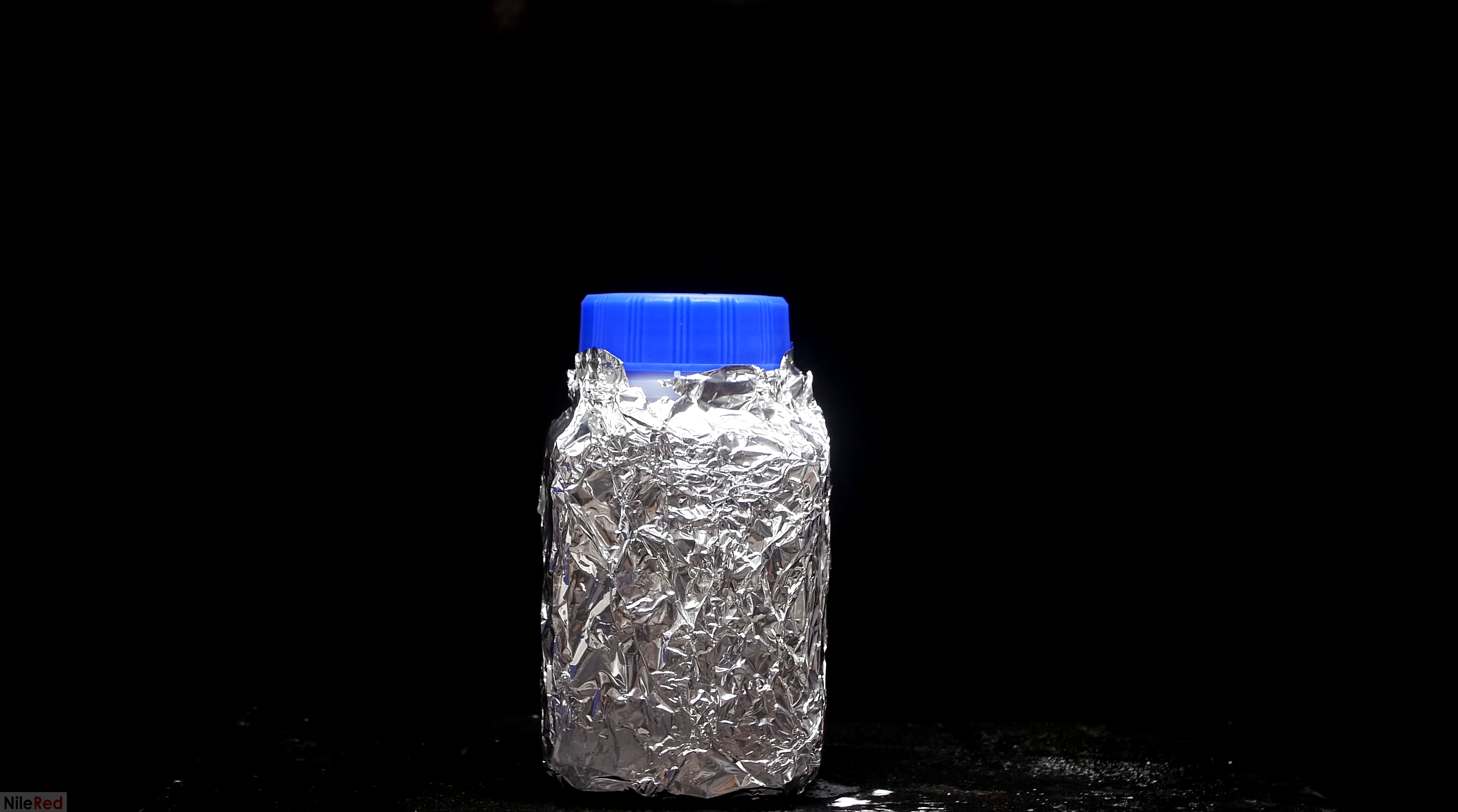As I said before, the silver nitrate is sensitive to light, so I covered it with aluminum foil to prevent it from degrading. The final yield of silver nitrate was 96 grams, which corresponds to a percent yield of about 98%. These types of reactions where we just react a metal with an acid usually have yields around 100%, so this isn't too spectacular.